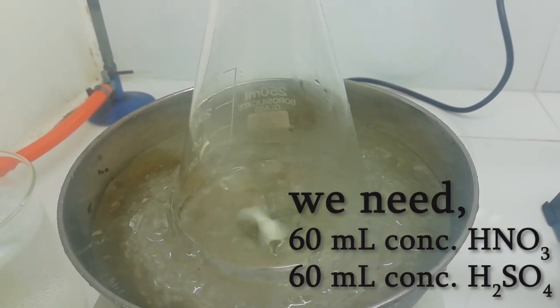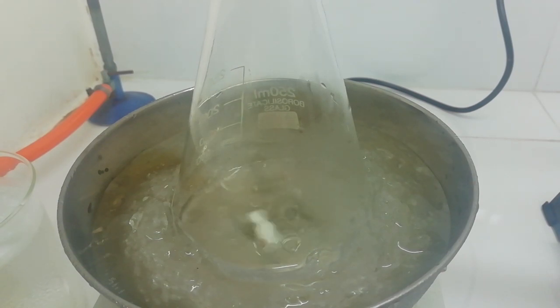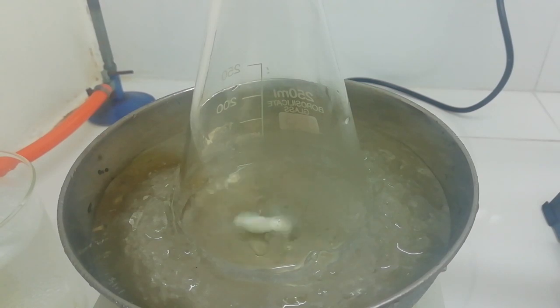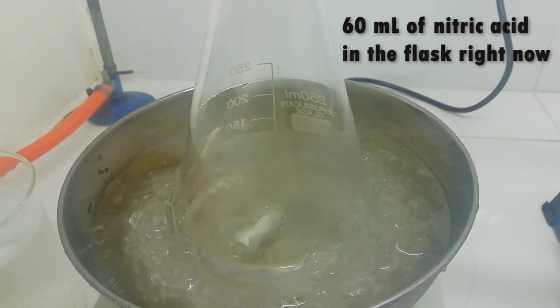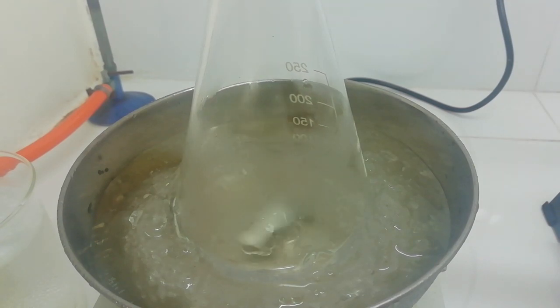Now you can see this is an ice bath. In this conical flask I have about 60 ml of concentrated nitric acid, and I have here about 60 ml of pre-chilled concentrated sulfuric acid.